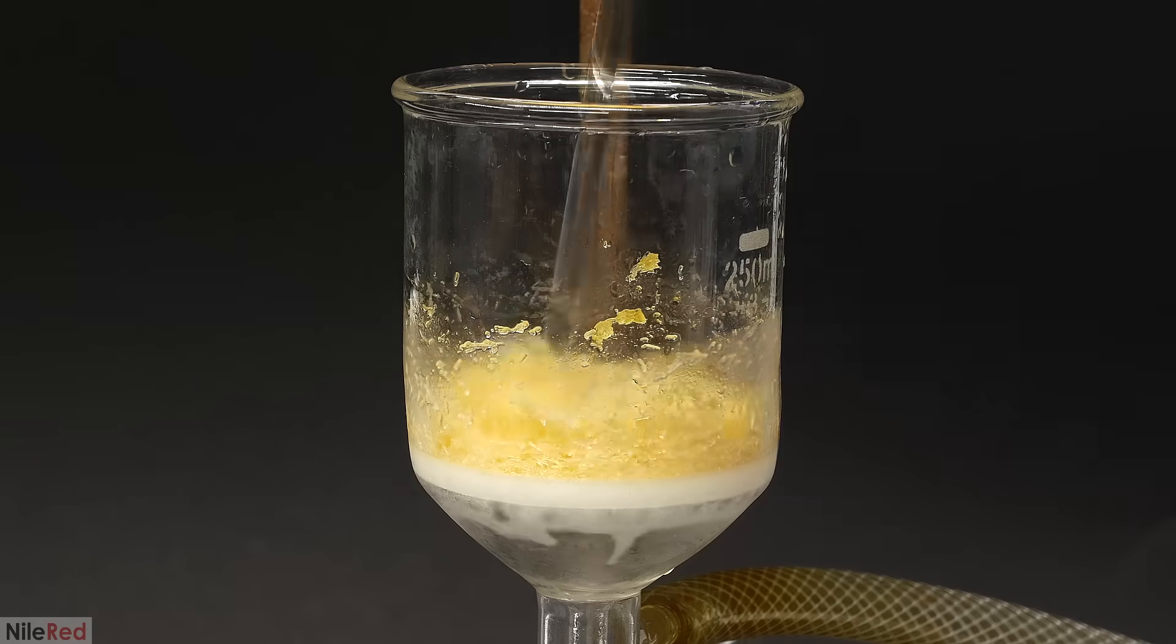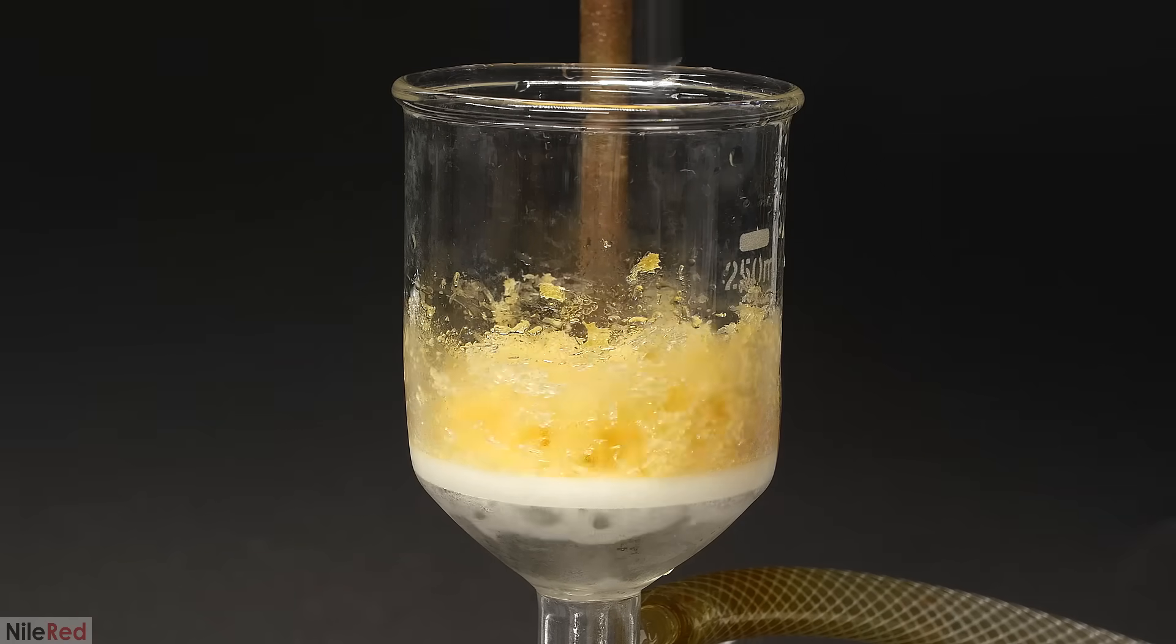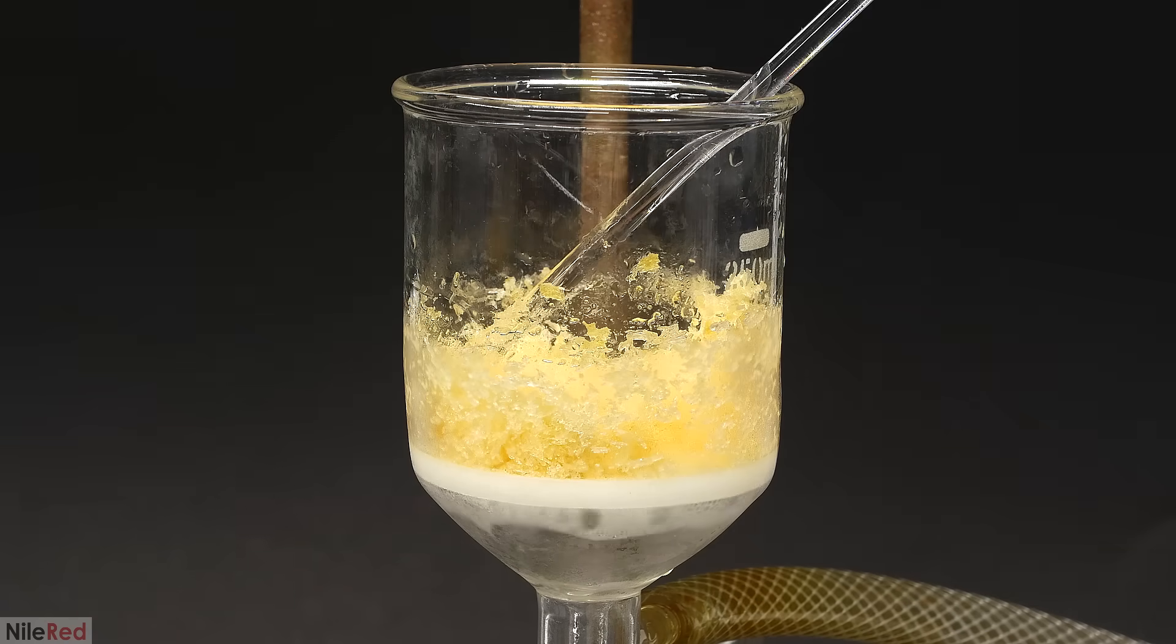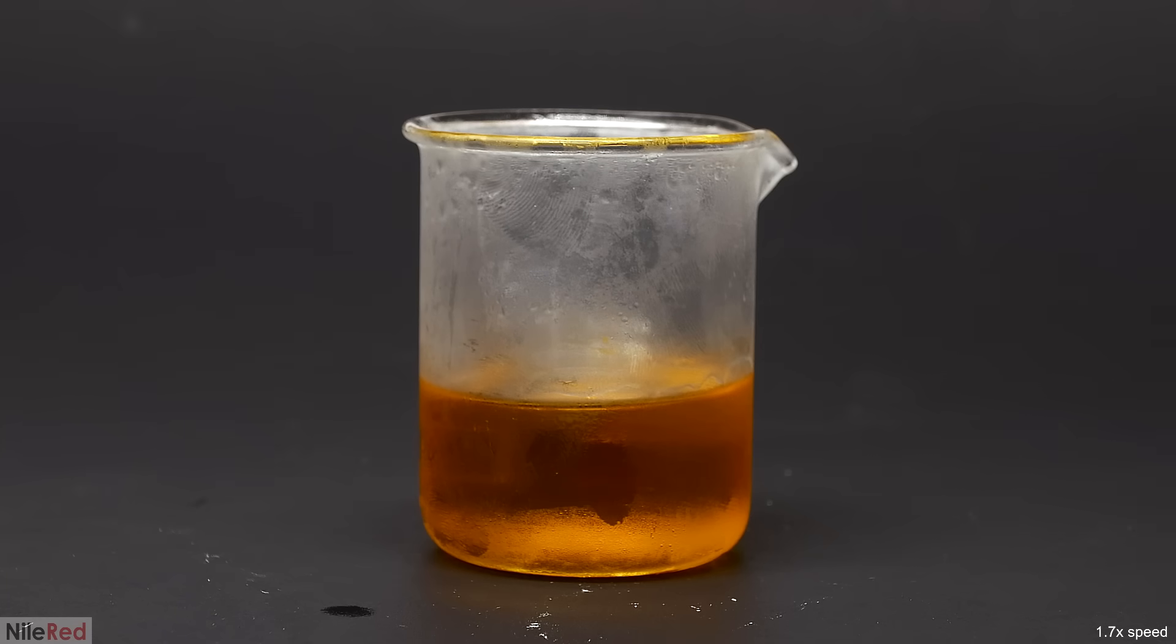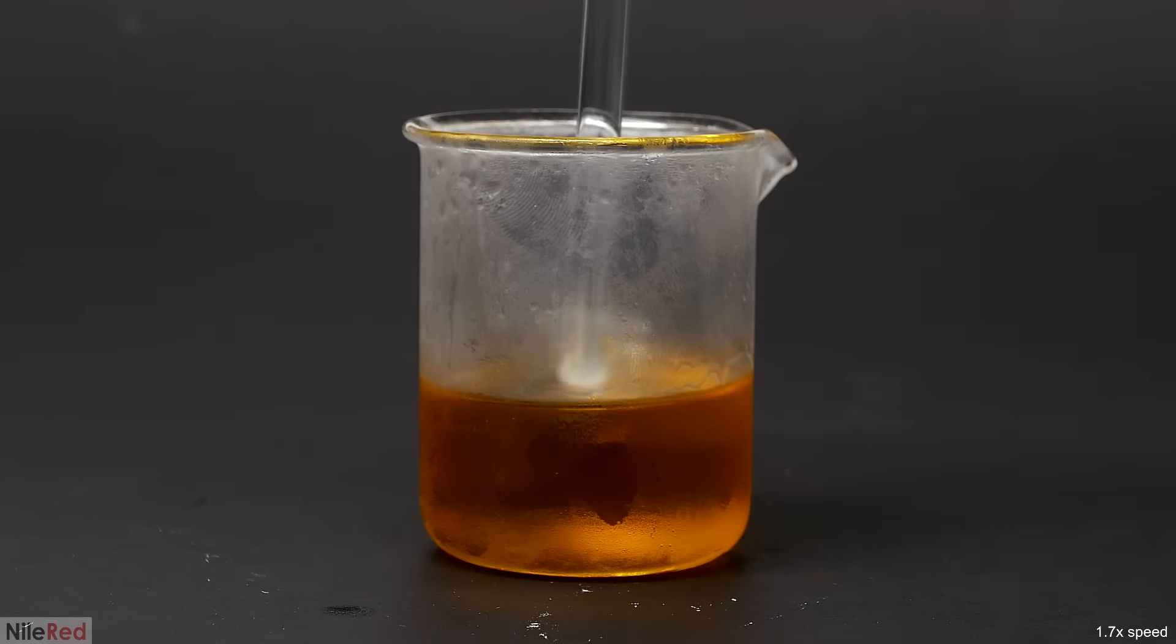Anyway, to get rid of the urochrome and any potassium nitrate that still might remain, I just need to recrystallize it a few more times from a mixture of water and ethanol. On the last run, nothing crystallized even when I put it in the freezer, which kind of scared me.